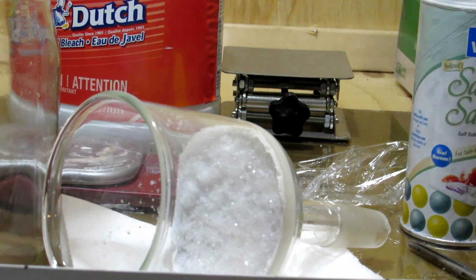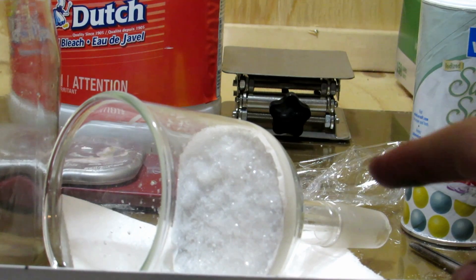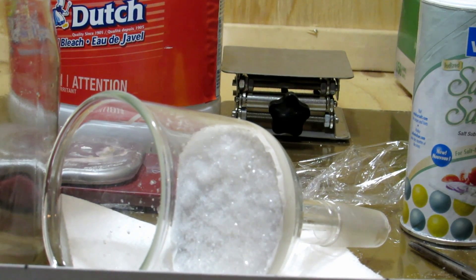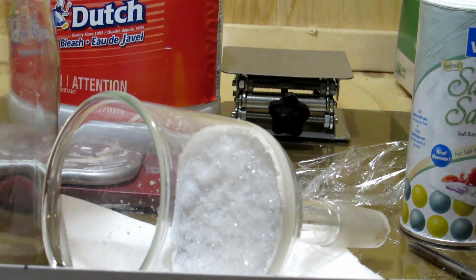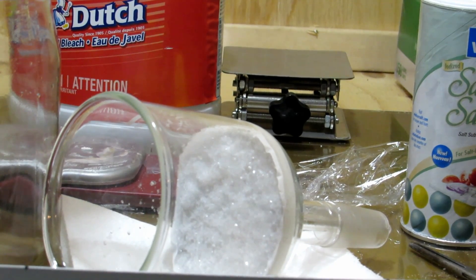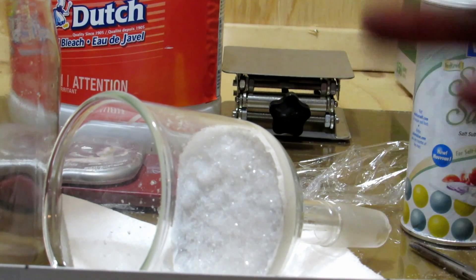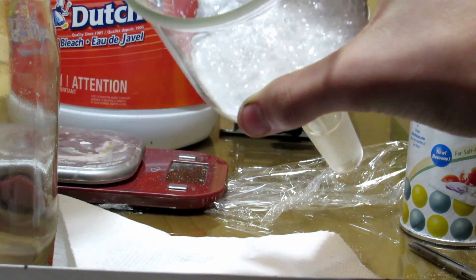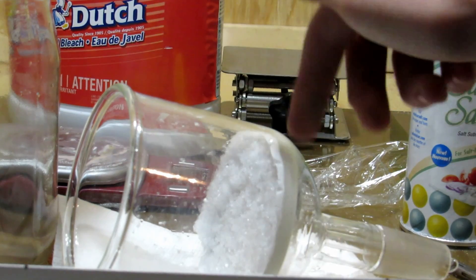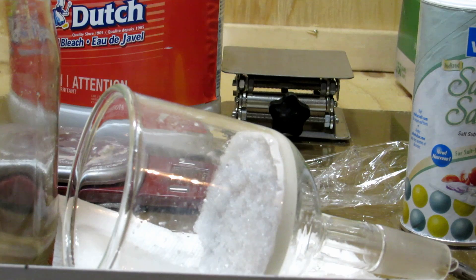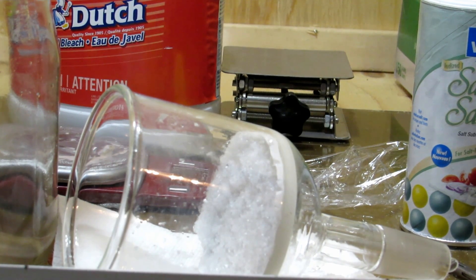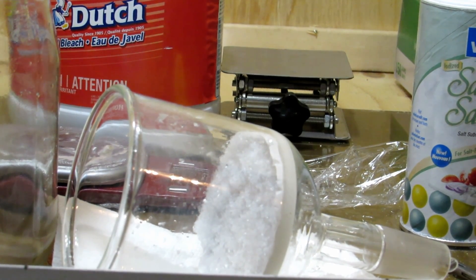All the solution that this potassium chlorate was crystallized out of, I'm going to boil it down to about 100 milliliters, and then try to put it back in the freezer and see if any more will precipitate out. That will be a slightly less pure product, but we should still be able to get a fair amount more than what we just have here. So I'm going to take this out of our filter here and we'll weigh that. In the meantime, we can go ahead and try to process our other solution. We'll just boil it down to about 100 milliliters, then I'll meet you back.